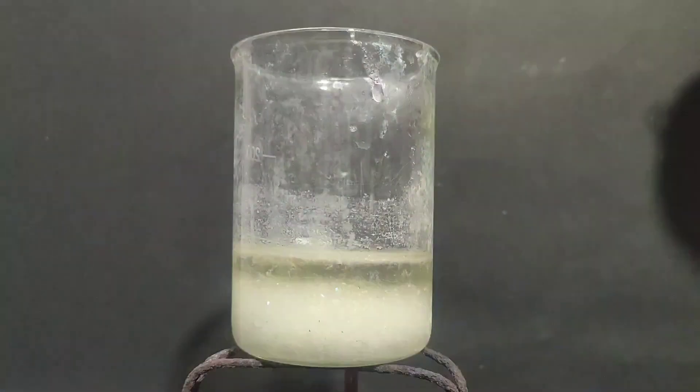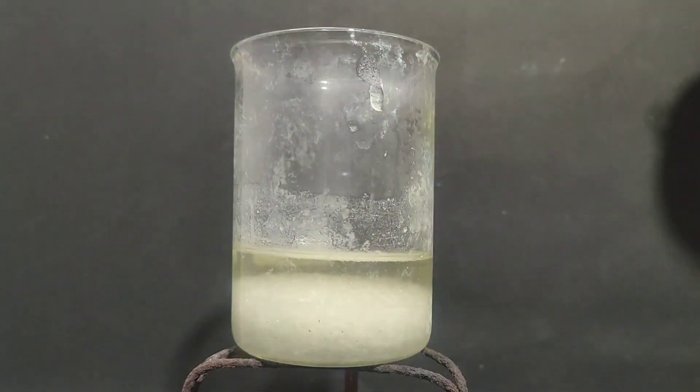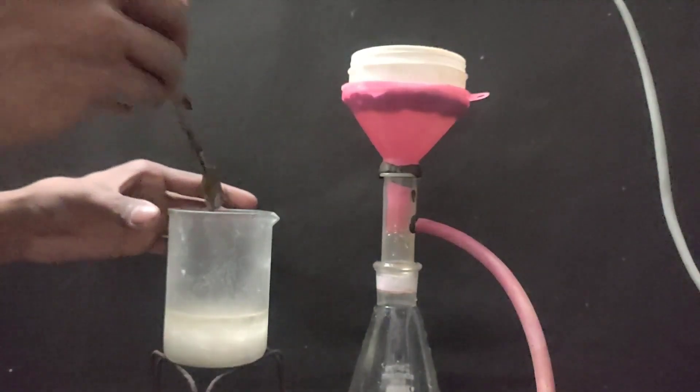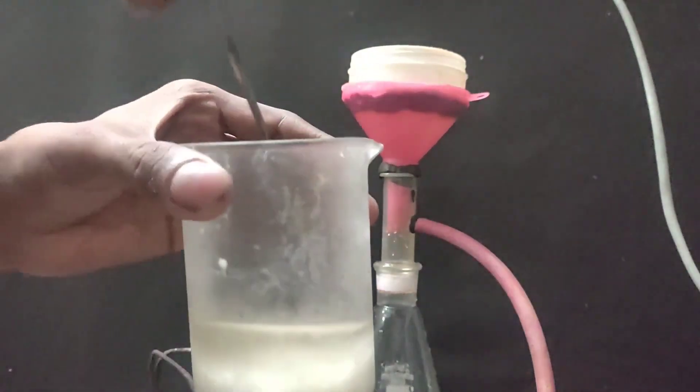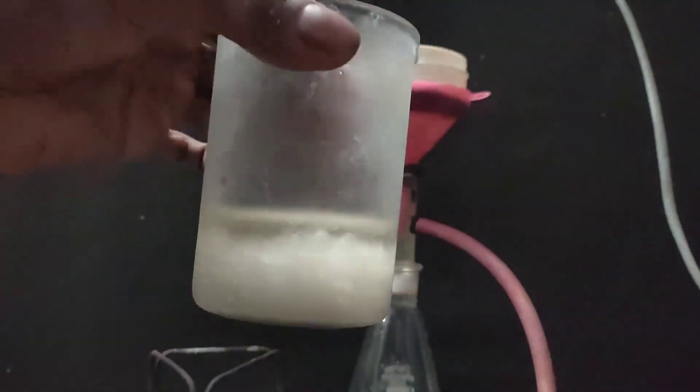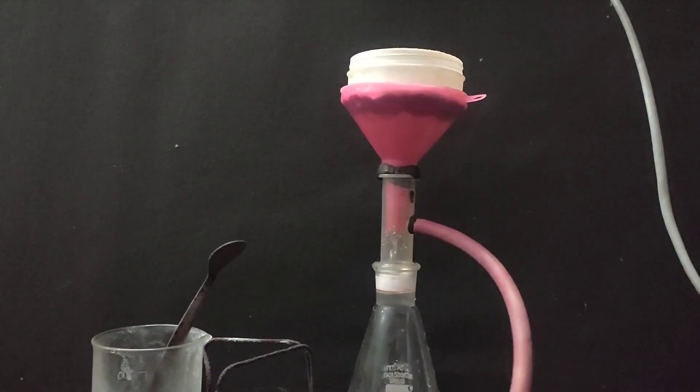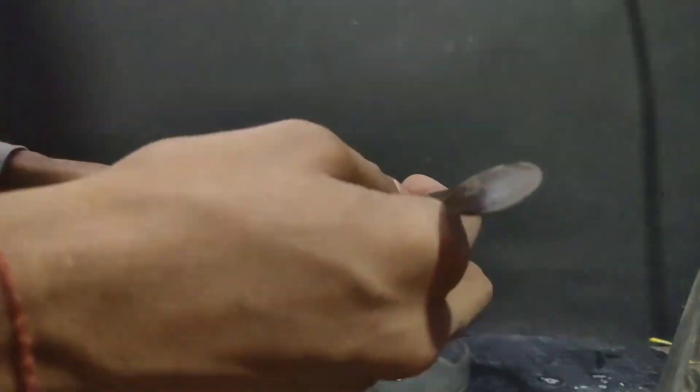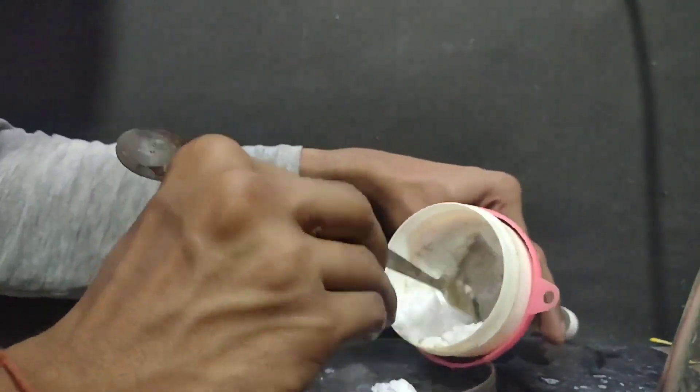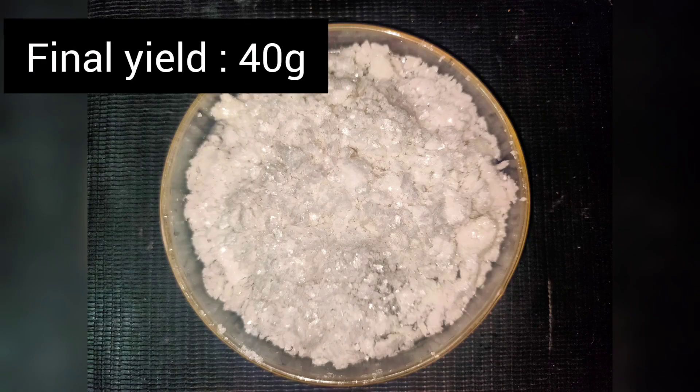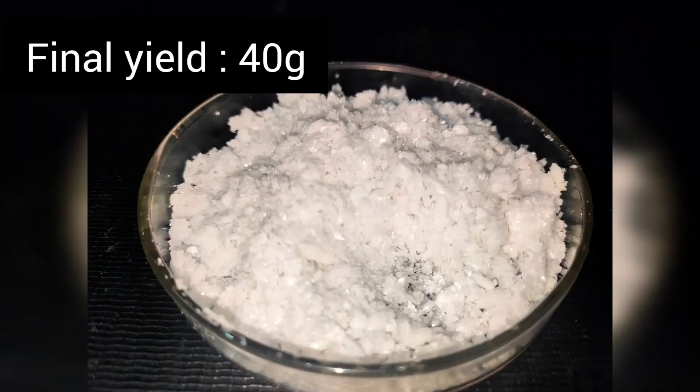Then I put the beaker in the freezer to chill till 0 degrees Celsius. The beaker was taken out of the freezer and the crystals were filtered off using my Buchner funnel. Then I took off the crystals in a petri dish and dried them in my desiccator. After drying, the yield came to about 40 grams.